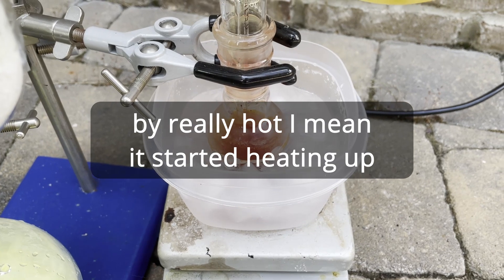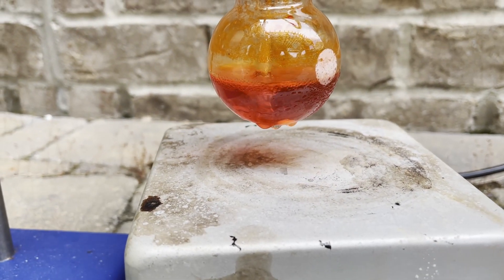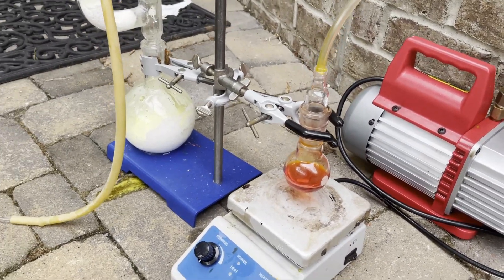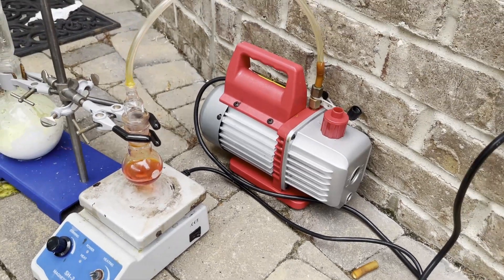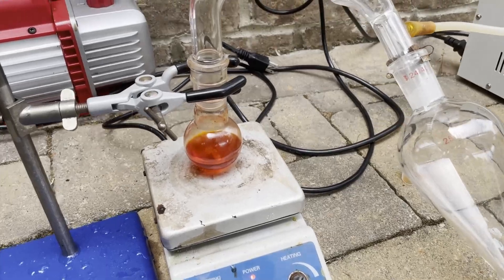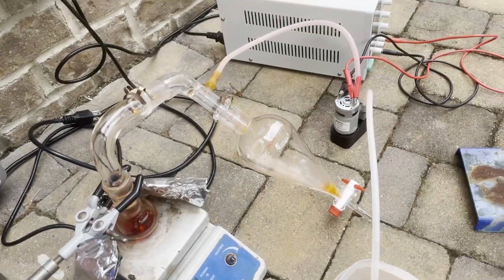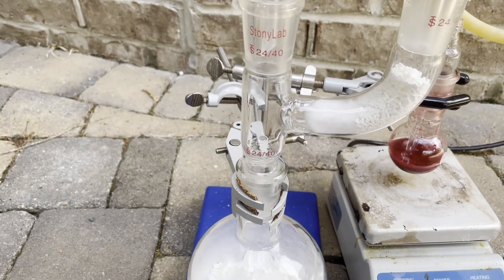As the reaction went on it got really hot, which is scary because we're going through a diazonium intermediate, so I put it in an ice bath — and you can see it's already starting to turn really orange. This is what the reaction looked like when it was over, and I let it heat back up to room temperature. You can see the plentiful bubbles of supposedly nitrogen, so that's a good sign. From here I was supposed to vacuum distill out the acetonitrile, leaving the chloro compound behind. However, the acetonitrile really wanted to stick around and refused to leave without bringing the chloro compound through the vacuum pump. I ended up damaging the vacuum pump with chlorine vapors, and I was not able to separate the final compound from the mother liquor — so what a fun waste of time. At least this reaction reminded me about how much I hate working with halogens, especially chlorine.